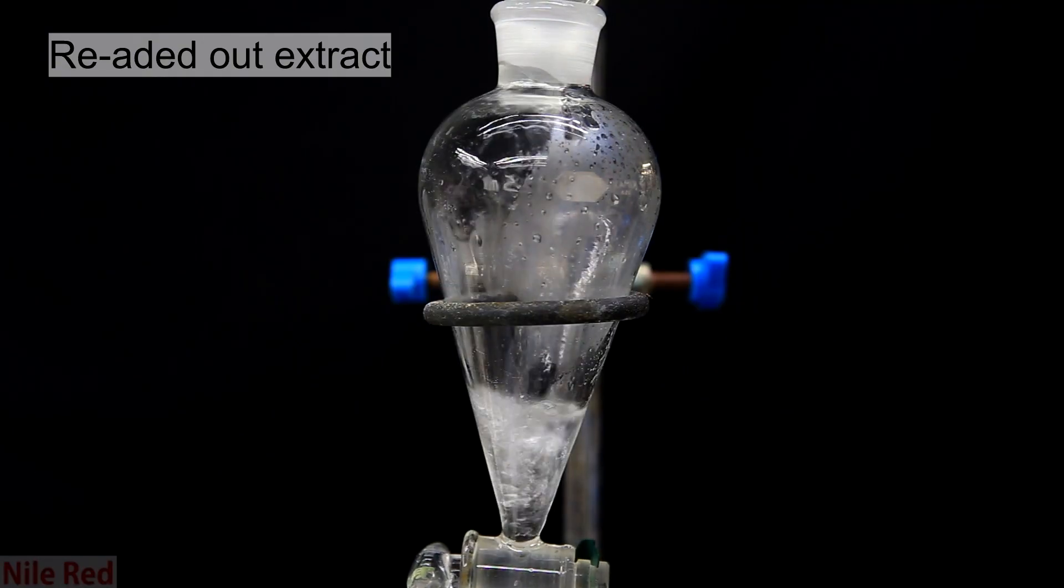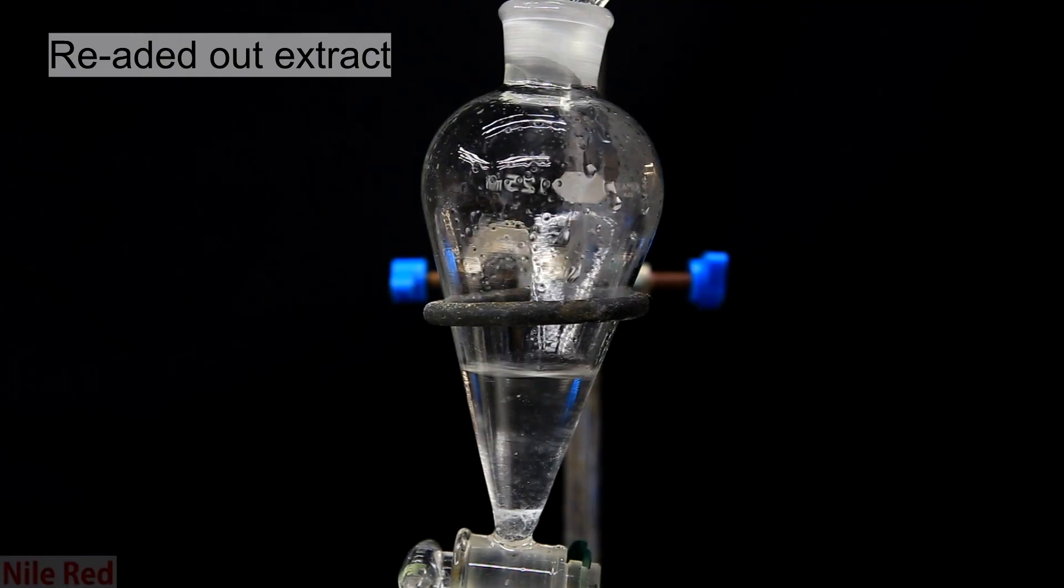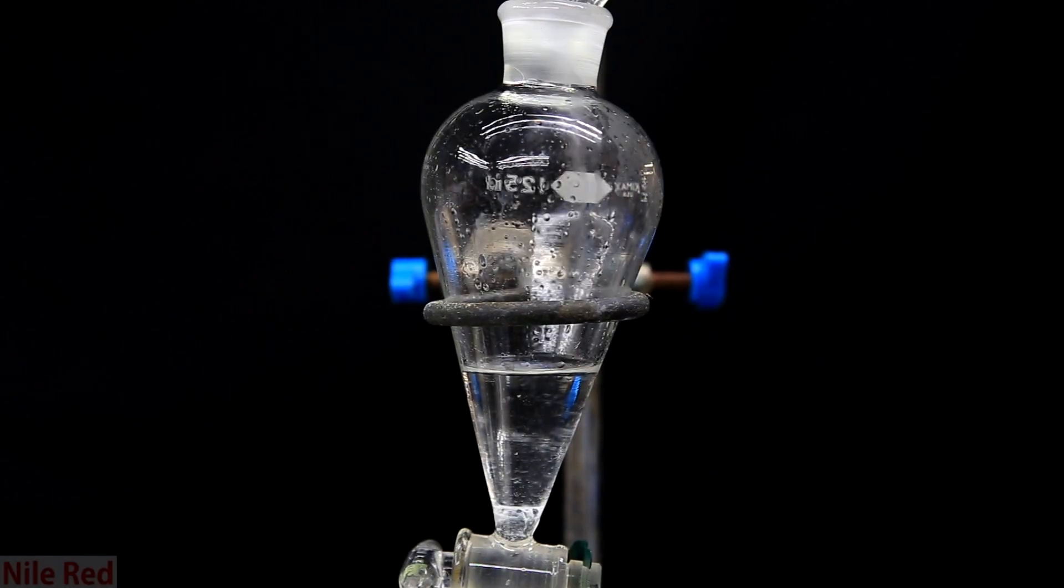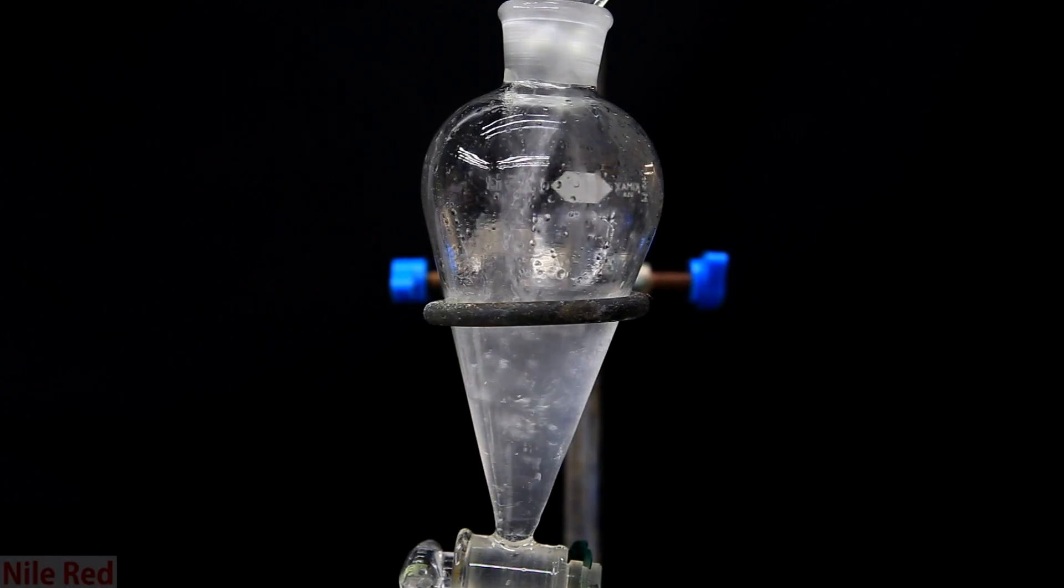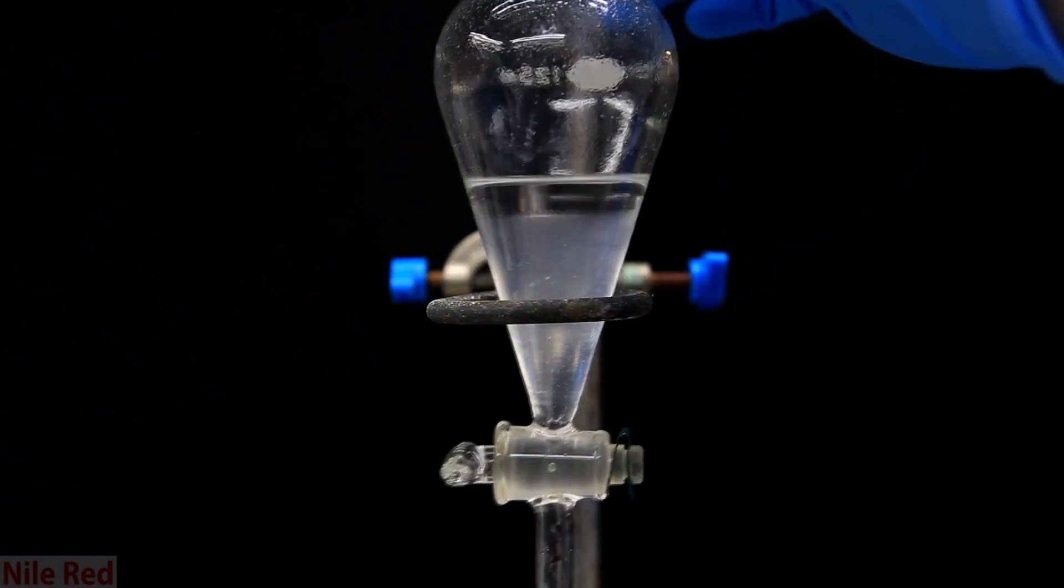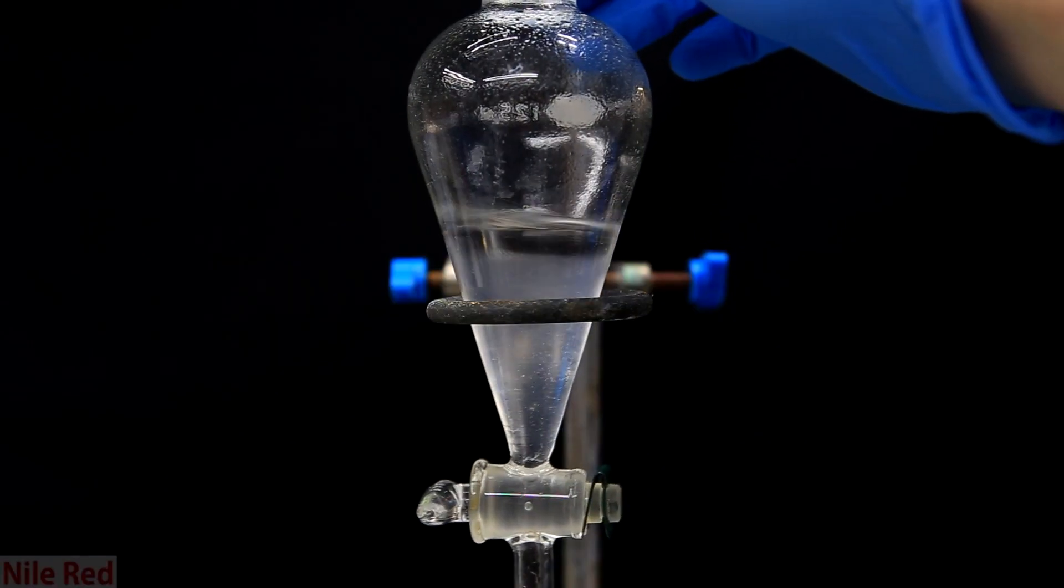A clean separatory funnel is then used and we pour in our 15 milliliters of diethyl ether. Then on top of this we pour in 25 milliliters of cold saturated salt solution. Diethyl ether actually dissolves quite a bit of water and the salt solution helps to dry it.